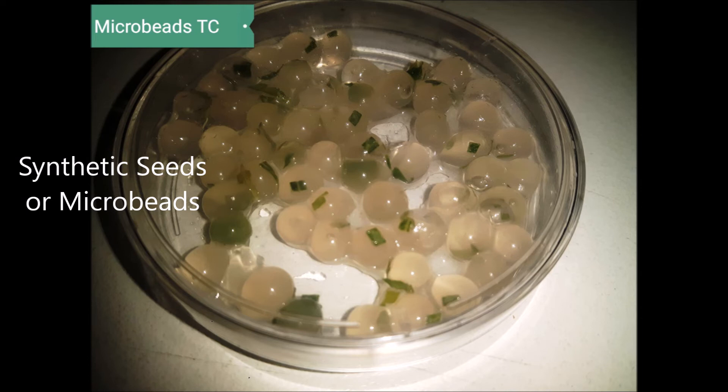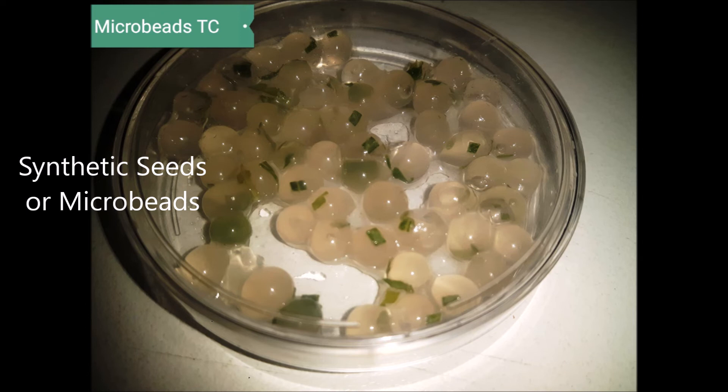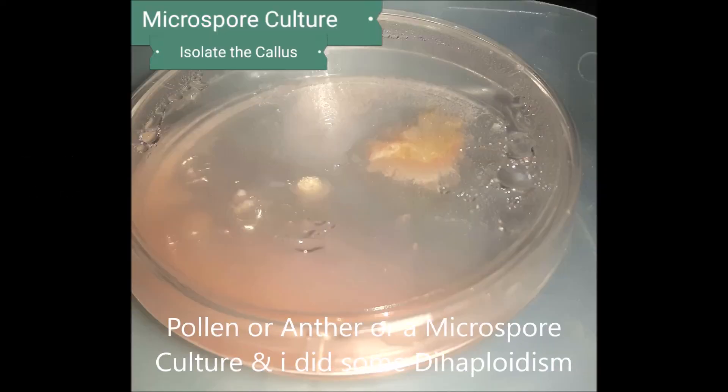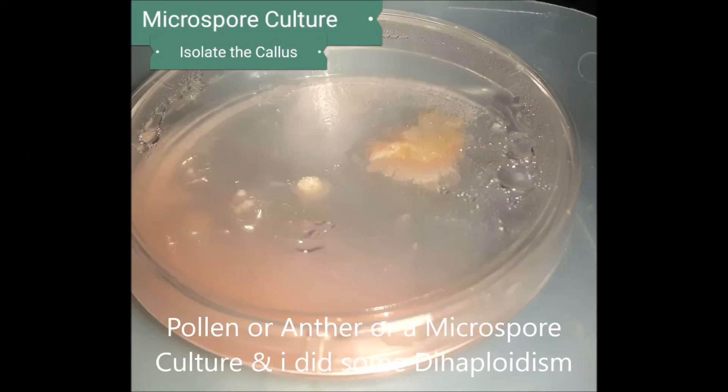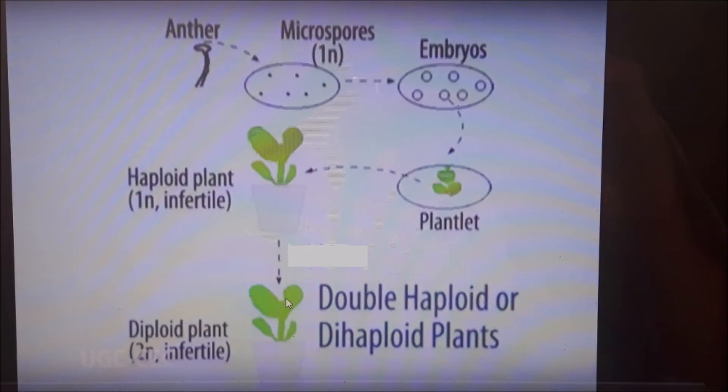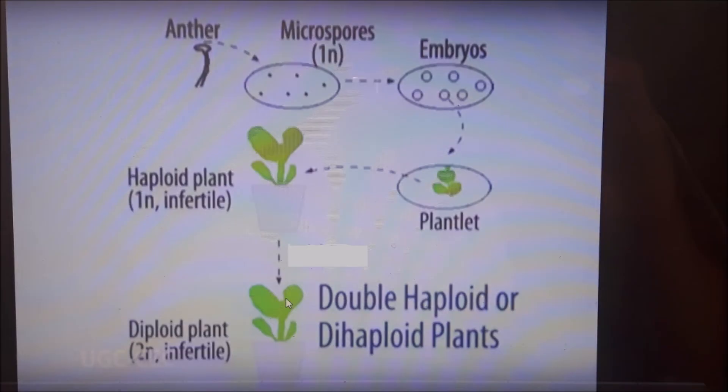I made an auxin mix, so I would just produce roots first and then go from there. That's another video — I'll post that link. Pollen culture from microspores — this was pretty cool, here's how I did it.